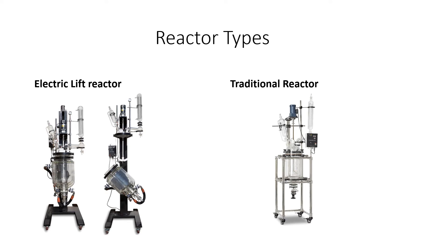Now we have a couple of different types of reactors here. The one over to the left is an electric lift reactor. What makes this special is that it's able to separate both the top cap part — which has the condenser and all that connected to it — away from the body of the reactor. This means you're able to easily get inside there and remove or add any kind of solids really easily.